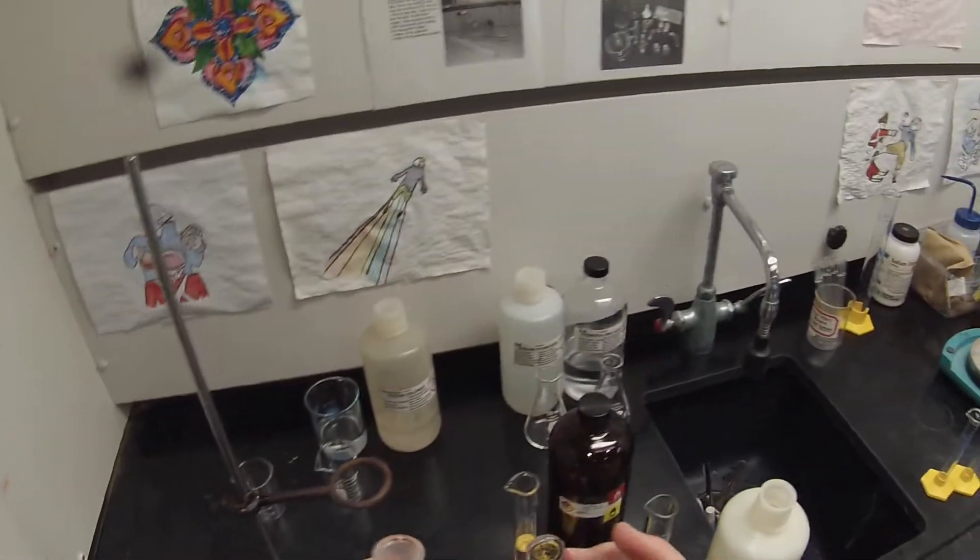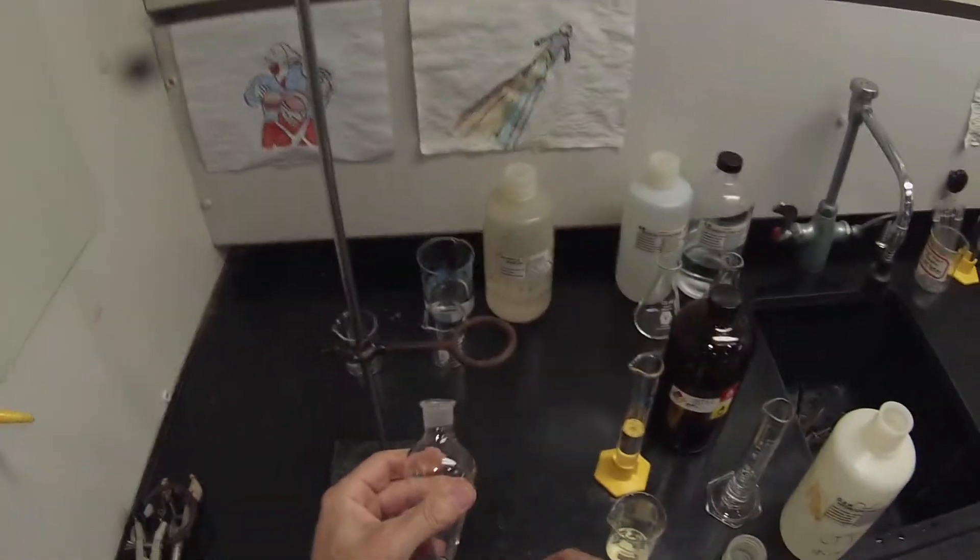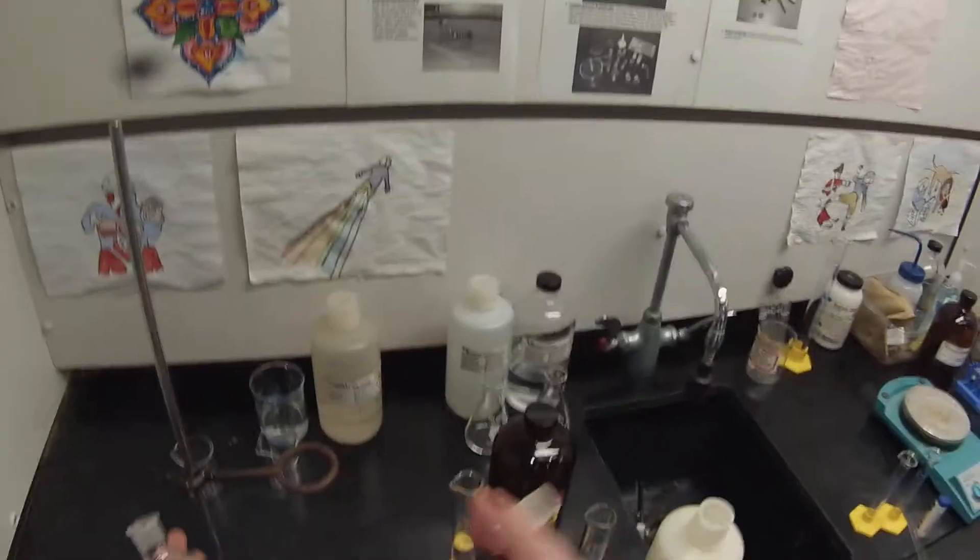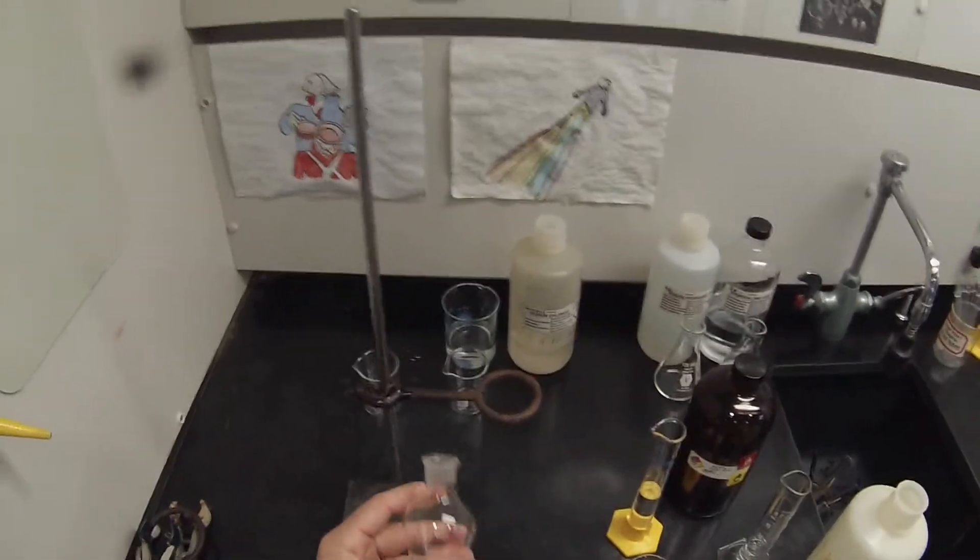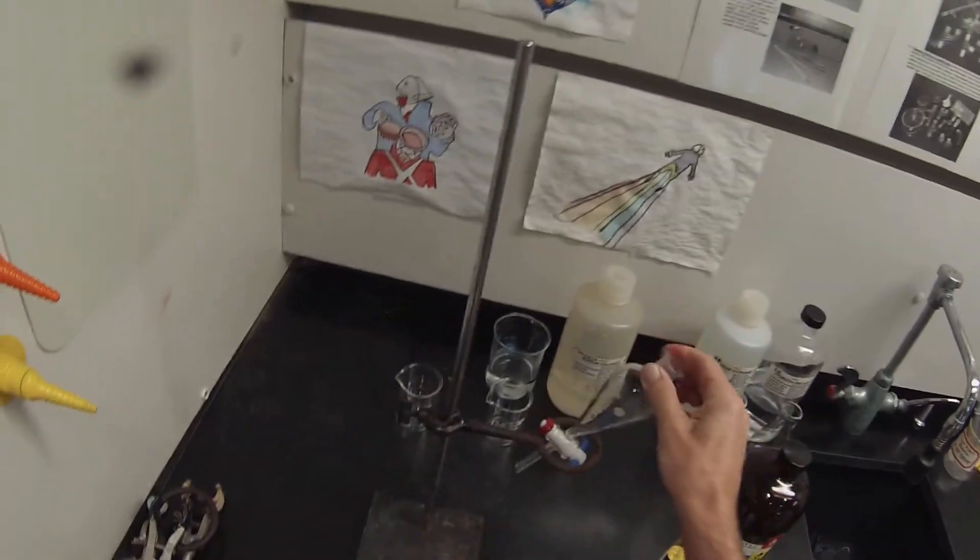We've got our separatory funnel and this is a slightly different size stopper for the top, a penny head that allows us to hold it. Smaller iron ring for the smaller funnel as well.